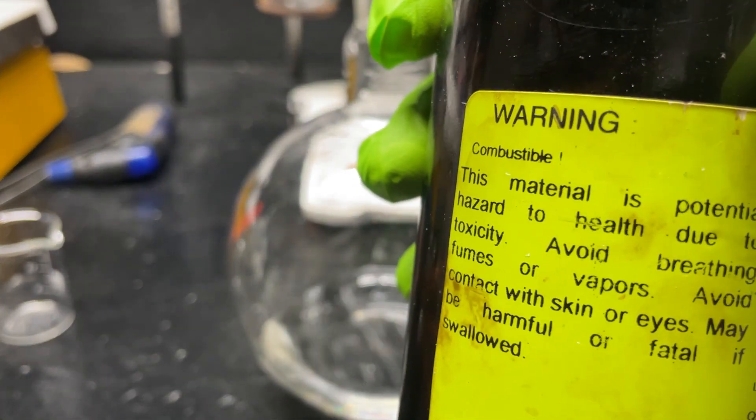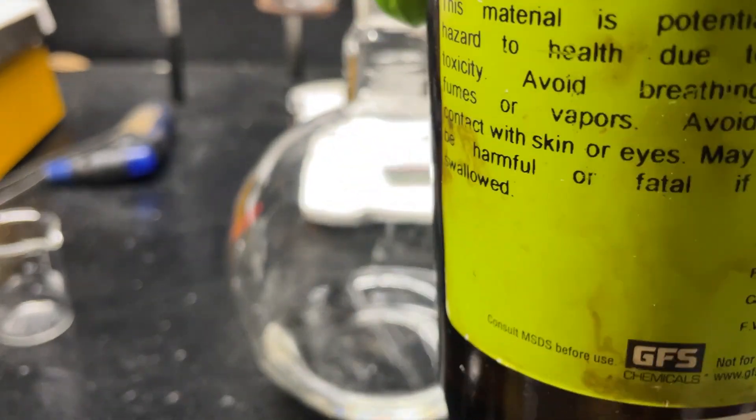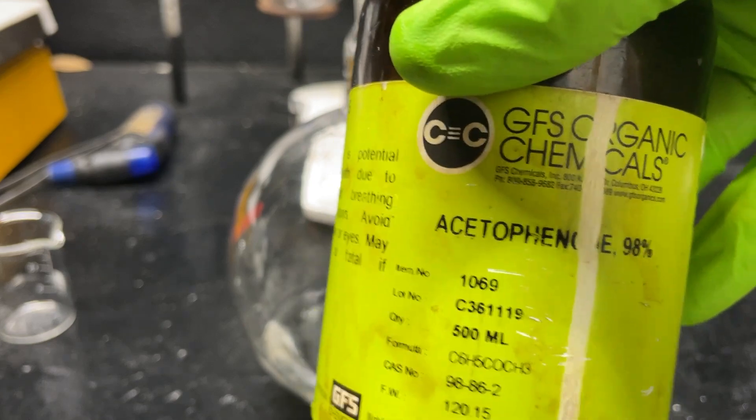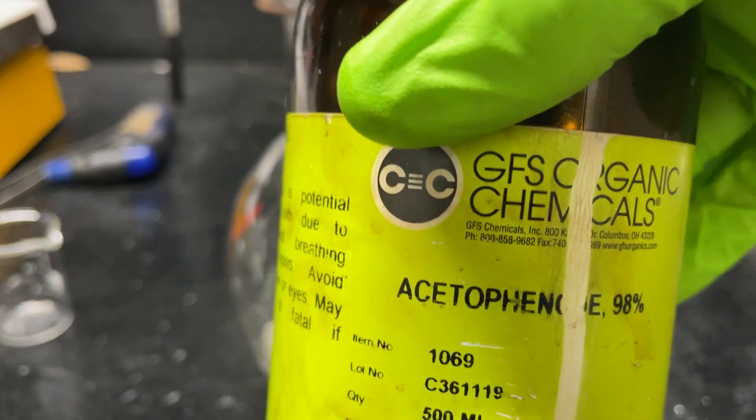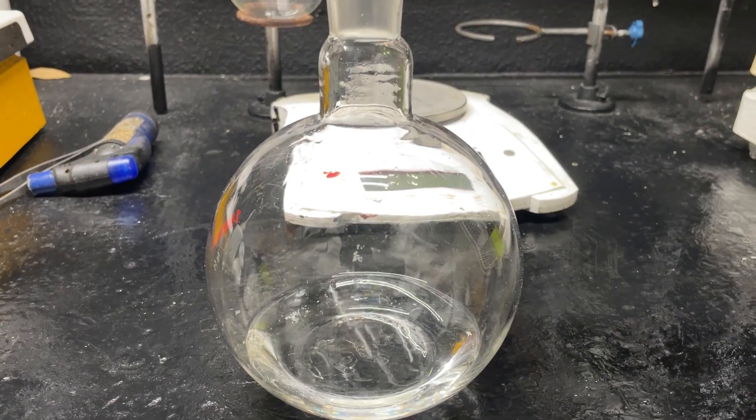And I love the smell of it, it's like a nice almondy smell, it's just so good. It smells a little bit like poop but that's mainly because I have a little bit of indoles still in here, and indoles is what gives poop its smell.